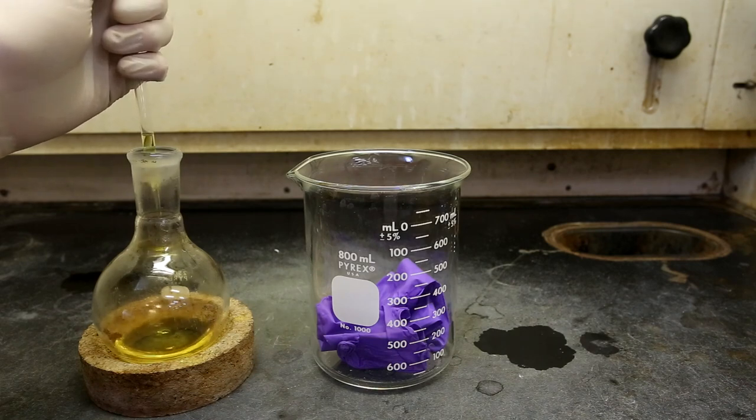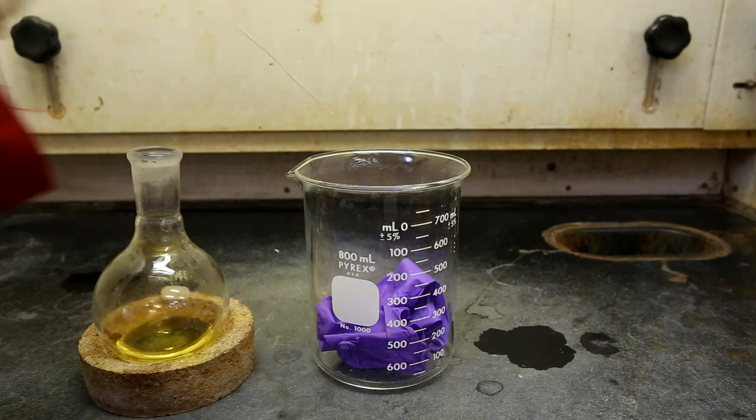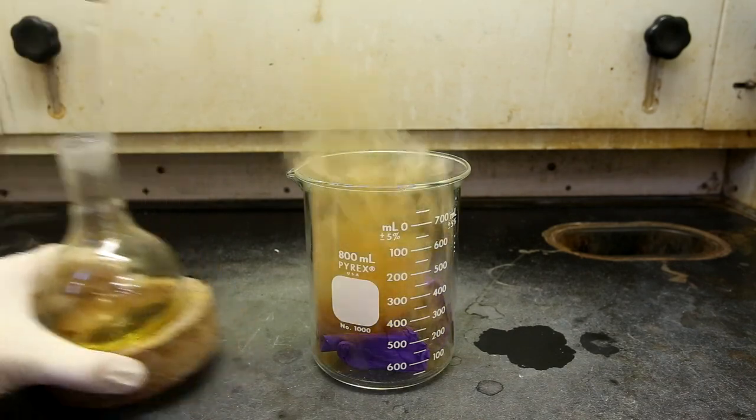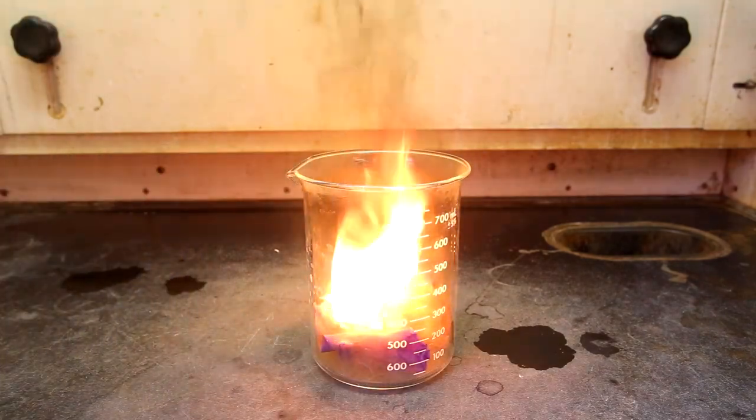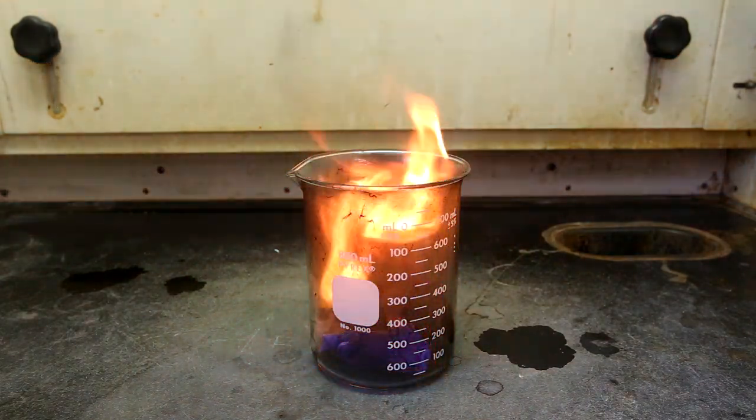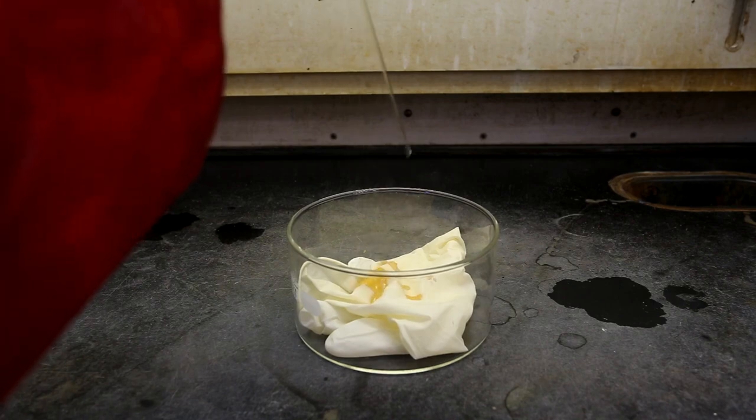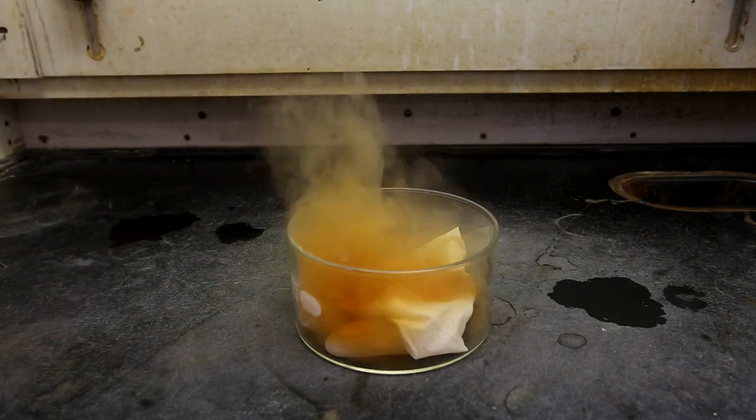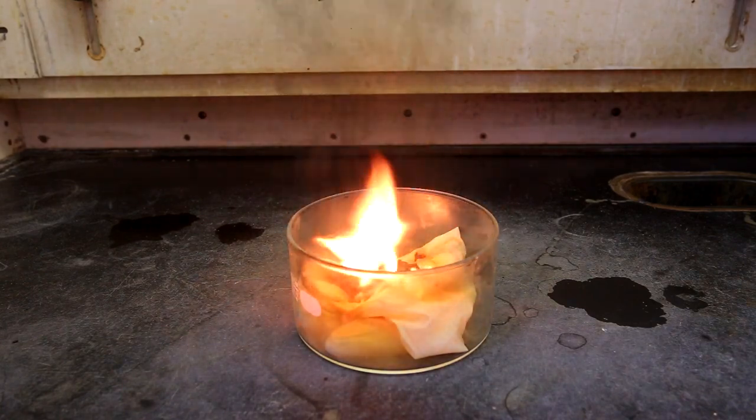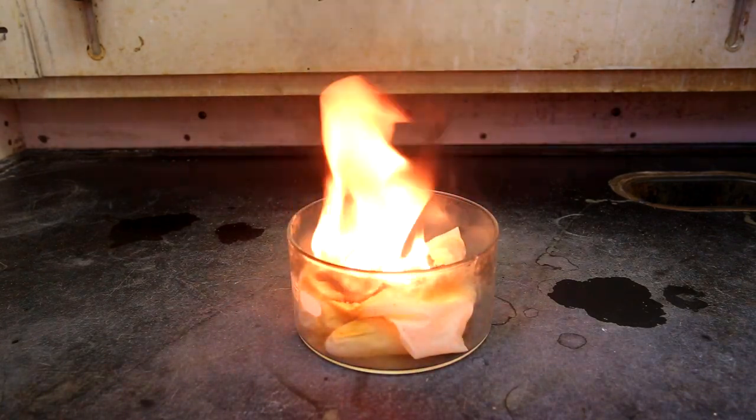Next is a demonstration on what fuming nitric acid does to typical lab gloves. First is about 2ml of fuming nitric acid on nitrile gloves. And surprisingly, the nitrile gloves quickly burst into flames. Adding 2ml to now latex gloves has a similar result. This is a good demonstration to show that lab gloves are not perfect and they are susceptible to chemicals.